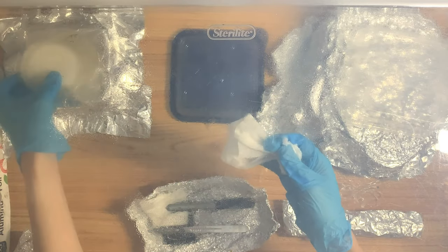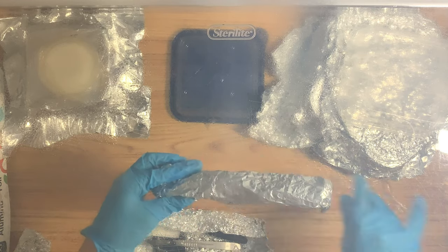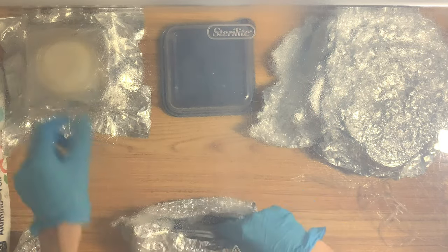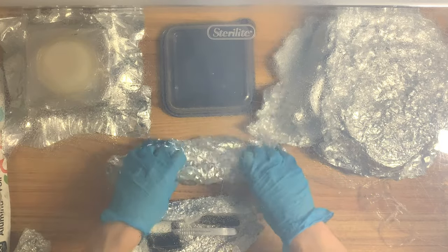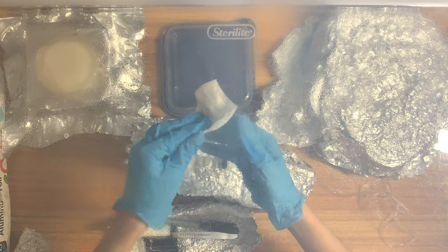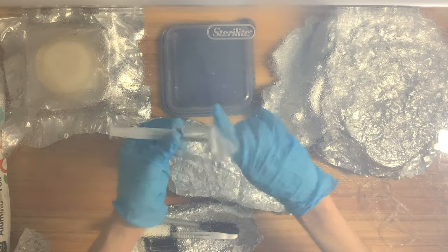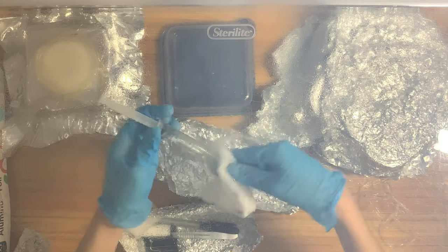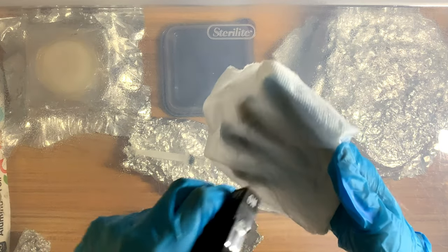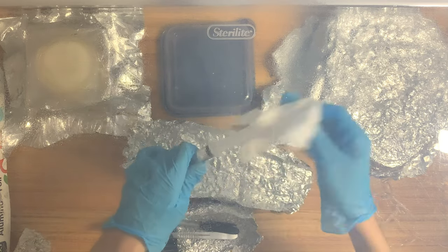So you must be asking: why would you choose to use agar slurry rather than liquid inoculant? Well, I use liquid inoculant for grain jars, but agar slurry I only use for BRF-style cakes, aka PF cakes, because it's a fantastic way to test out untested genetics. If I've got a bunch of plates I need to test out — basically untested cultures — I could quickly whip it up, make an agar slurry, and just inject a bunch of PF jars and check their growth. I don't even know if it's a culture worth propagating, so I just want to test it out. That's what it's fantastic for, because it's in a needle, it's immediate, and with BRF jars you usually have four holes to insert the syringe. So this tech is fantastic because you could immediately put the contents of an agar plate into a syringe and make it ready for inoculating BRF jars.